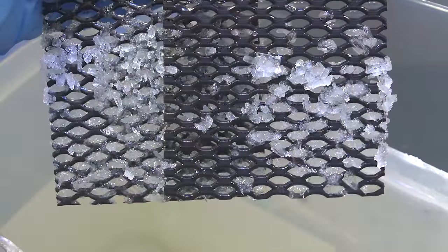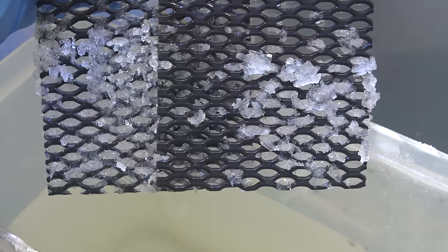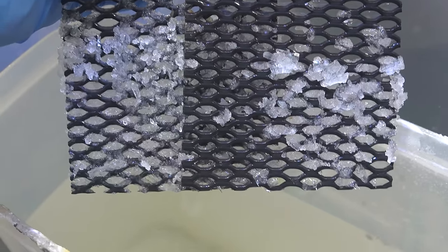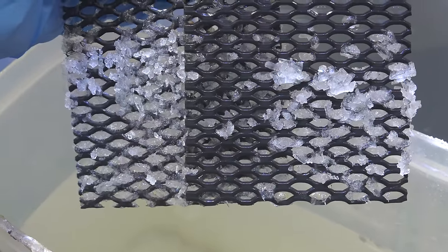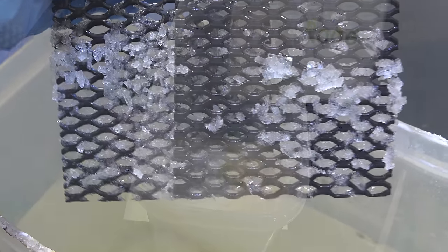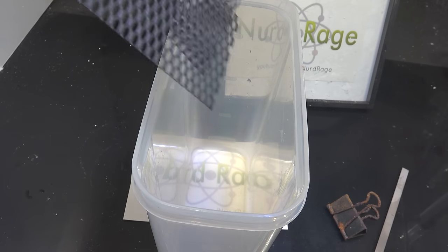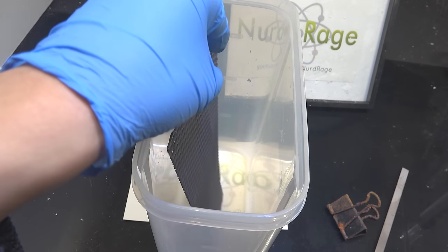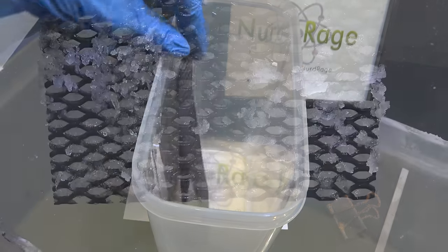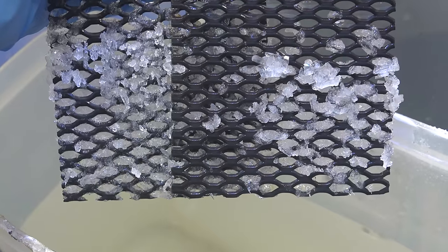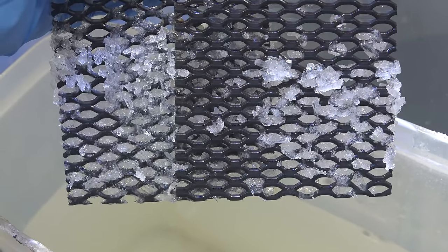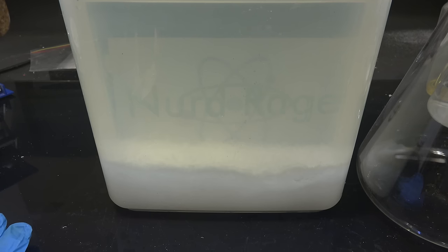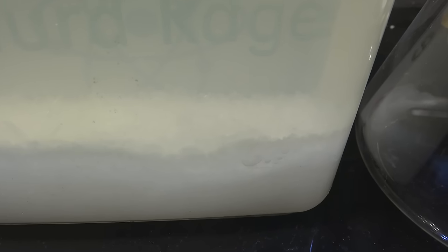On a side note you can see potassium chlorate crystals crystallizing on the anode itself. This is something you want to avoid as this blocks the solution from reacting with the anode. In my cell this was unavoidable since the electrodes are as big as my container. But if you can, generally keep your electrodes off the bottom of the cell so they're not covered by precipitating potassium chlorate. Anyway, here is the cell with electrodes removed and we have a beautiful crop of large potassium chlorate crystals.